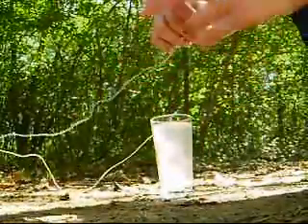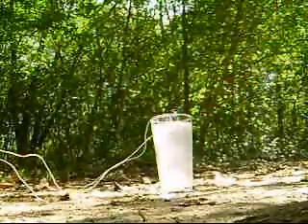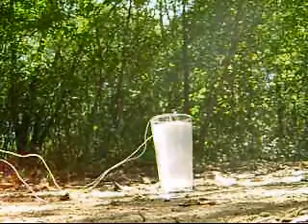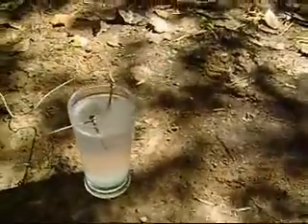Yep, and it's making bubbles. Now just leave that — this is going to get really hot. Make sure you put it out where you're not afraid to lose anything or get anything damaged. Come back when this has turned to rust, and then I'm going to show you how to purify it and make it usable for thermite.